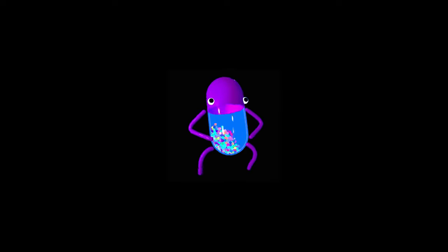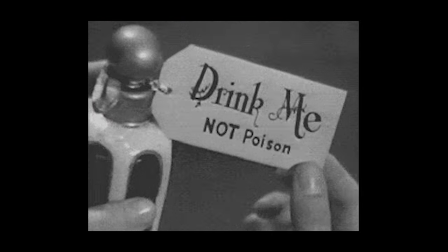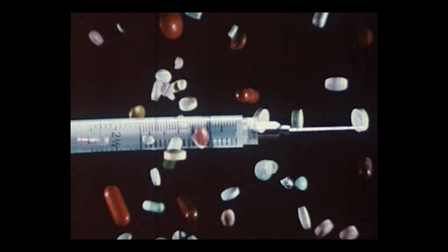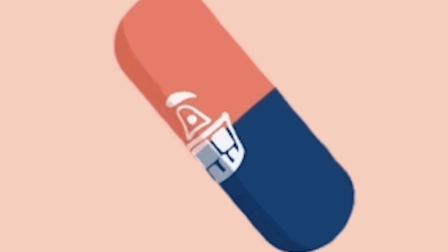Melatonin supplements often contain unspecified quantities of additional ingredients. In order to achieve a pure synthesis of the 5-MeO-tryptamine, the melatonin must first be extracted from the commercially available precursors. First, the solubility of the individual chemicals were recorded, and an ideal solvent was determined.